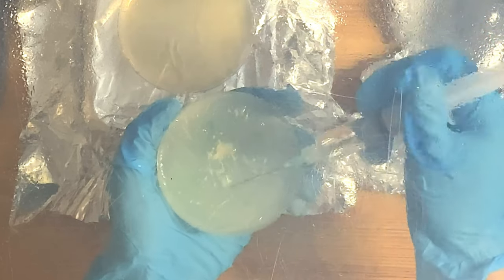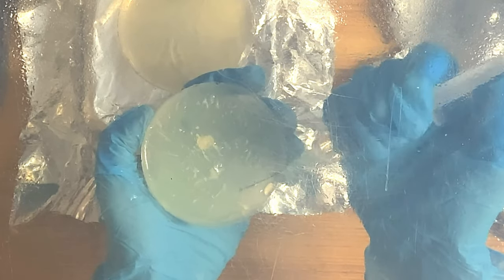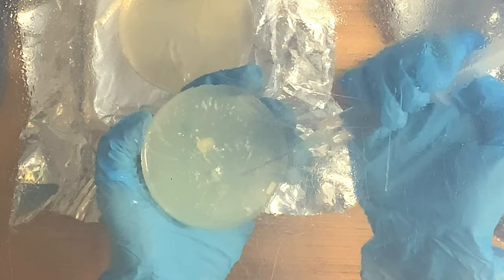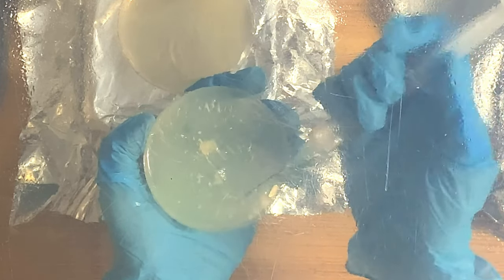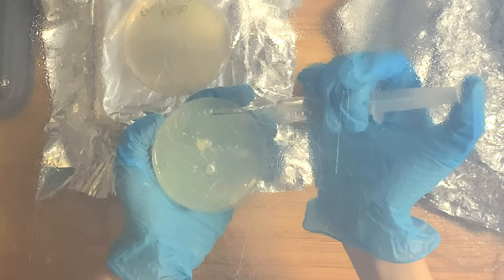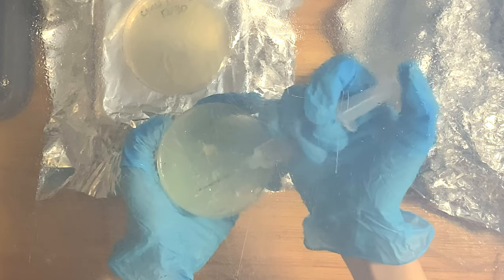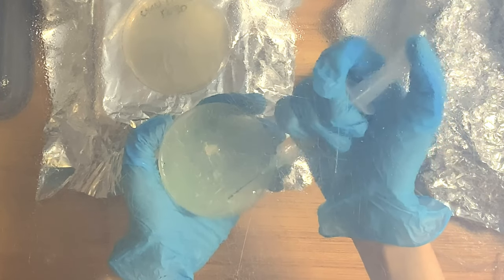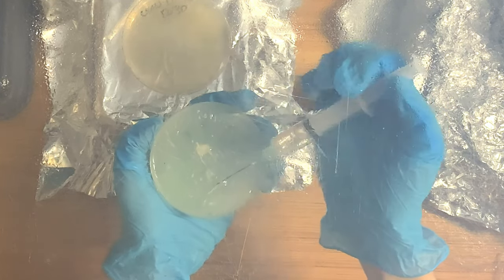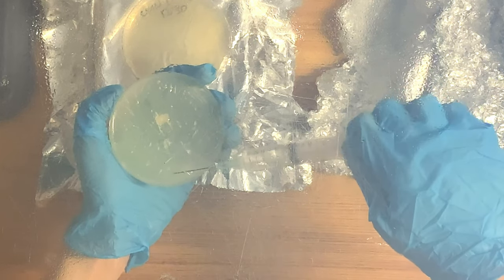So while I was talking, what I did was after I finished scraping most of the mycelium off, I shot some more water from the top of the plate so I could get some extra bits of mycelium onto the pool of water with the rest of the mycelium towards the bottom edge of the plate. Because remember, it's angled, and that's where I want all the water and mycelium bits to go, because from there I will eventually be sucking it up into the syringe. It's very, very important that you use minimal force — no force at all. Just basically touching the needle onto the plate and gently scraping it. That is more than enough.